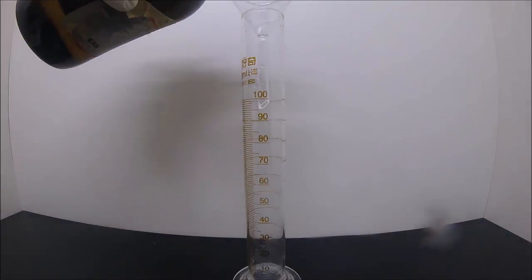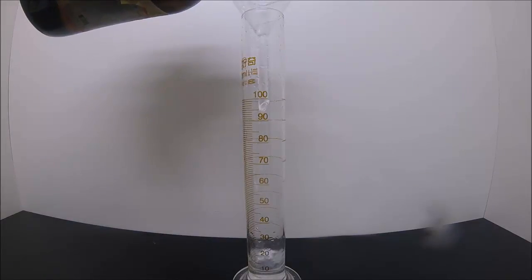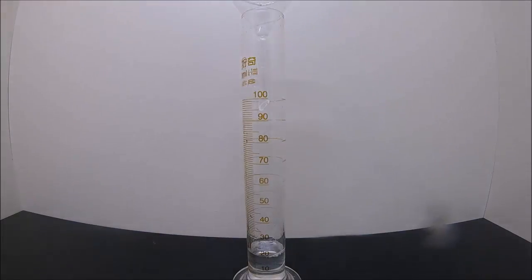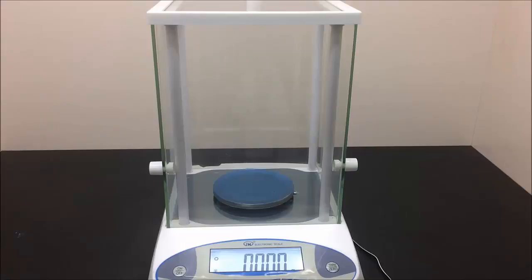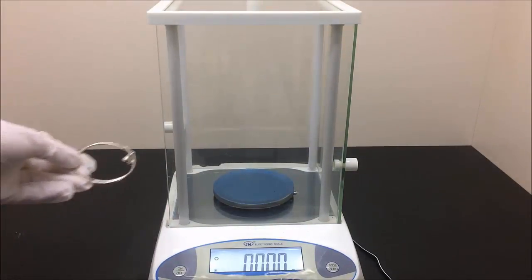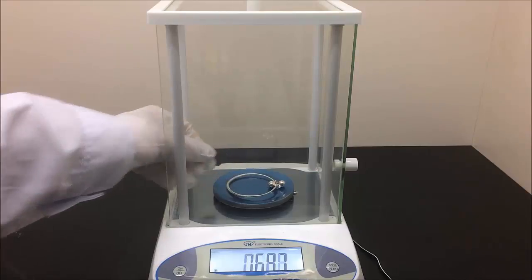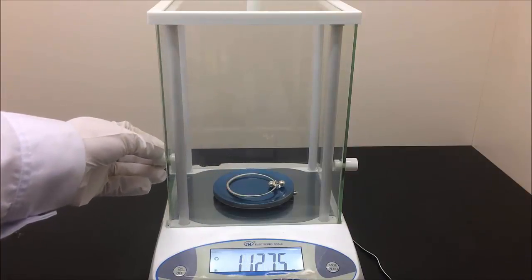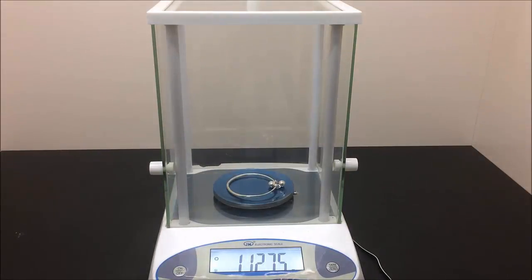First, 20ml of nitric acid is measured using a graduated cylinder. Then I get my digital balance to weigh out the mass of silver, which is about 11.275 grams. This step was done long before I started anything else, which allows me to calculate the amount of acid needed.